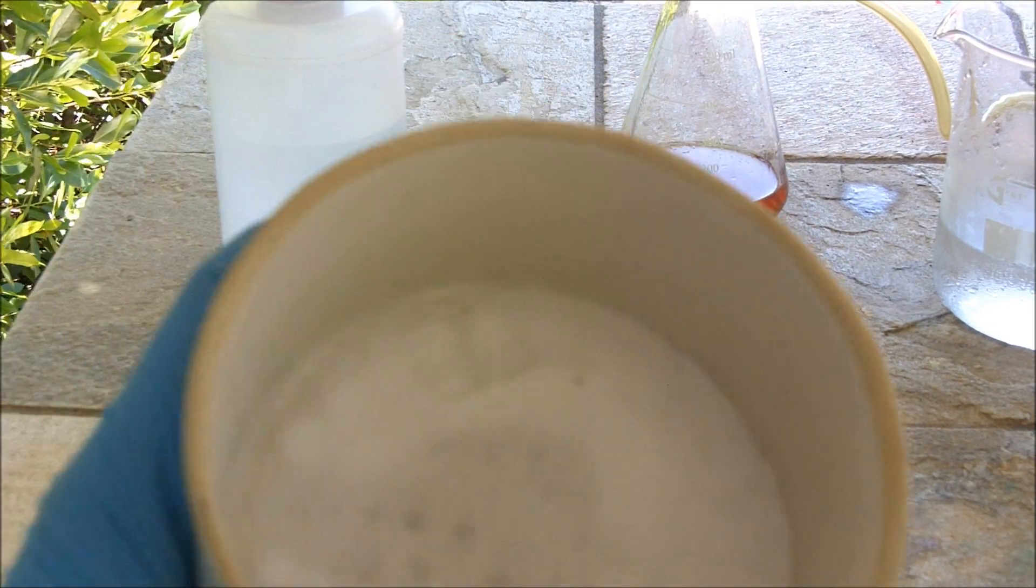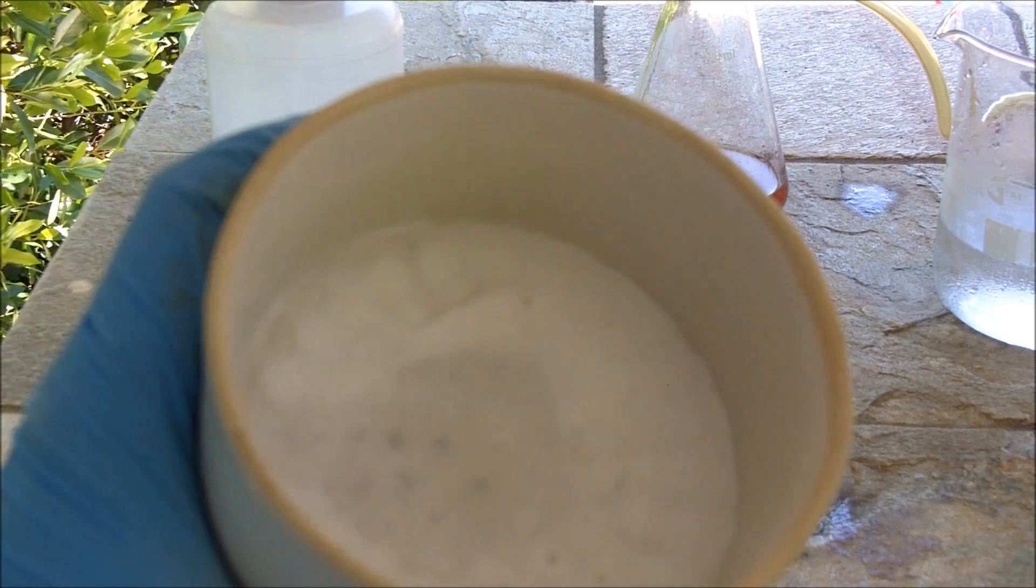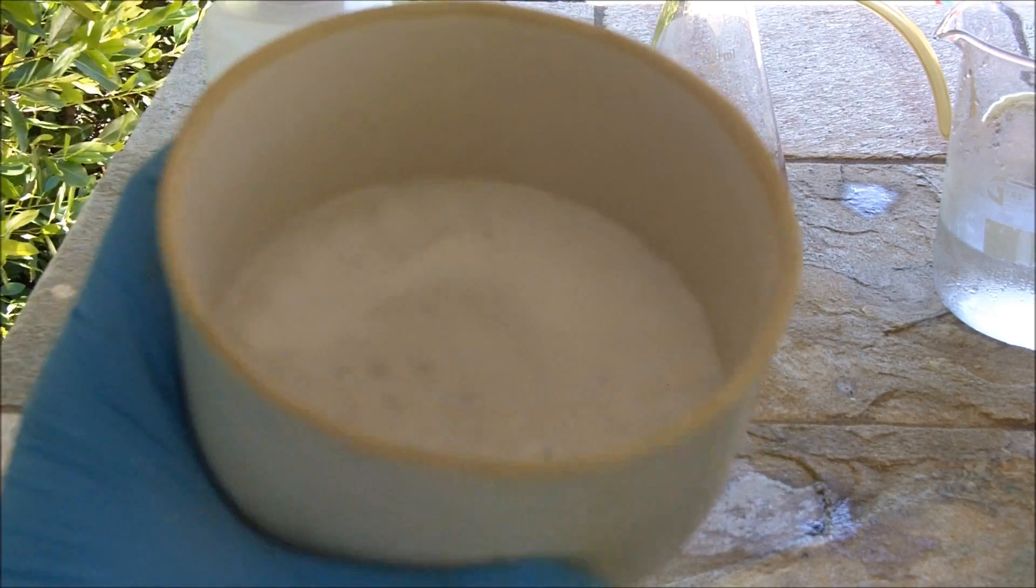Just ran the vacuum filter and here is what I have in my Buchner funnel. A pretty good quantity of hydrazine sulfate. I will dry this and store it in a vial.